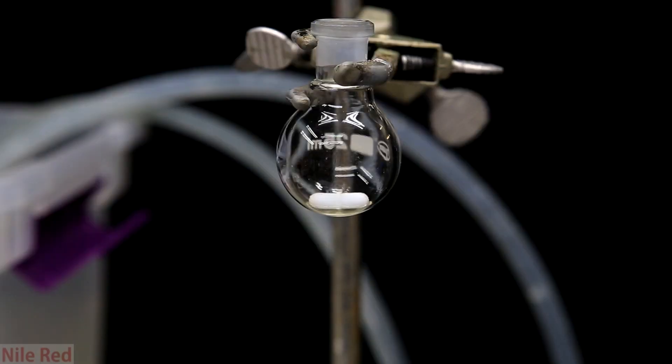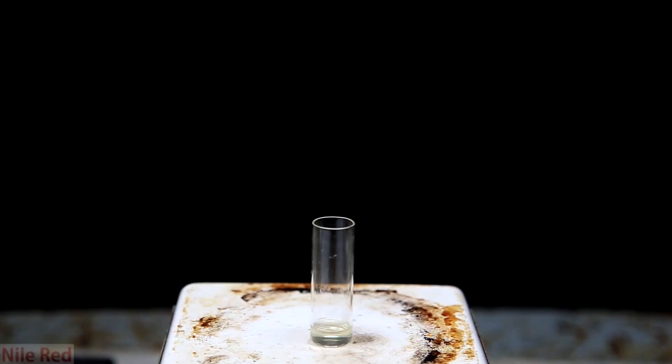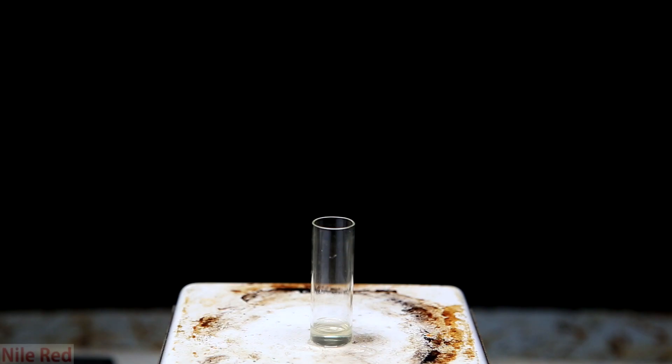Anyway afterwards we're left with a slightly yellow oil at the bottom. I then transferred it to a small vial for storage. I actually planned to do an NMR on it to characterize it but I totally forgot.